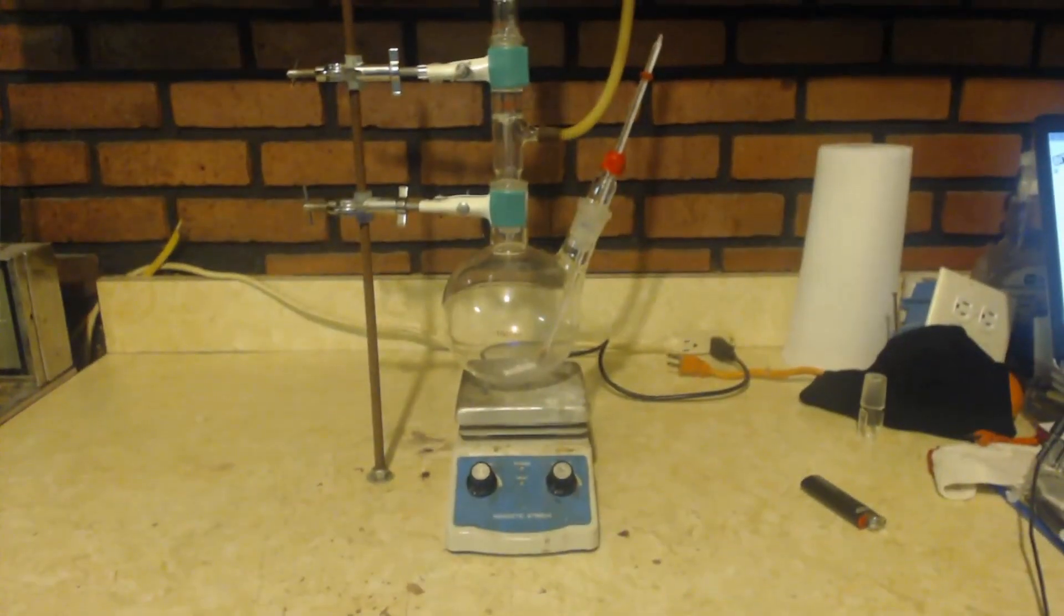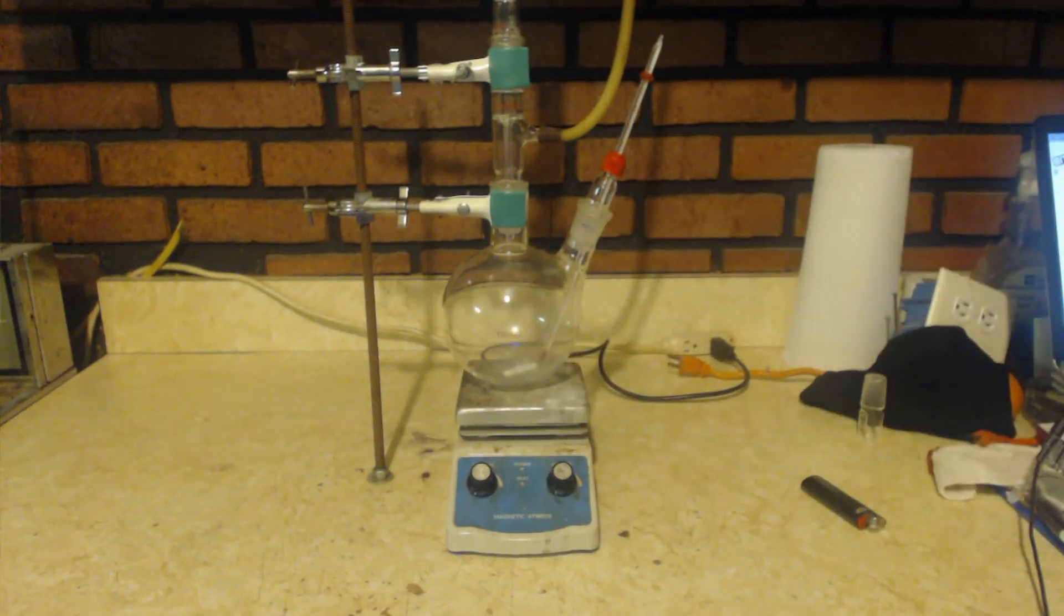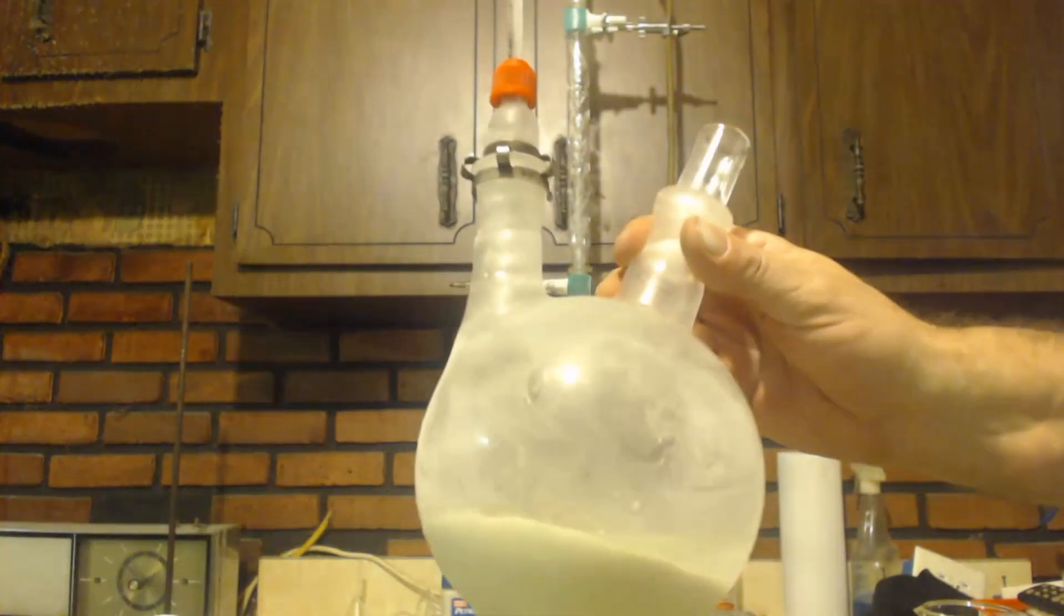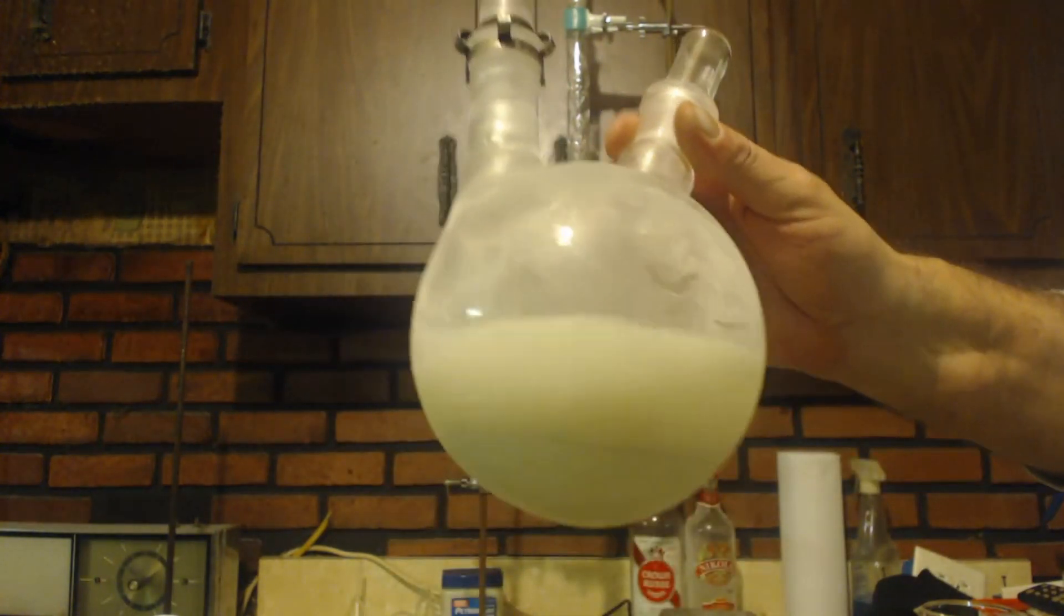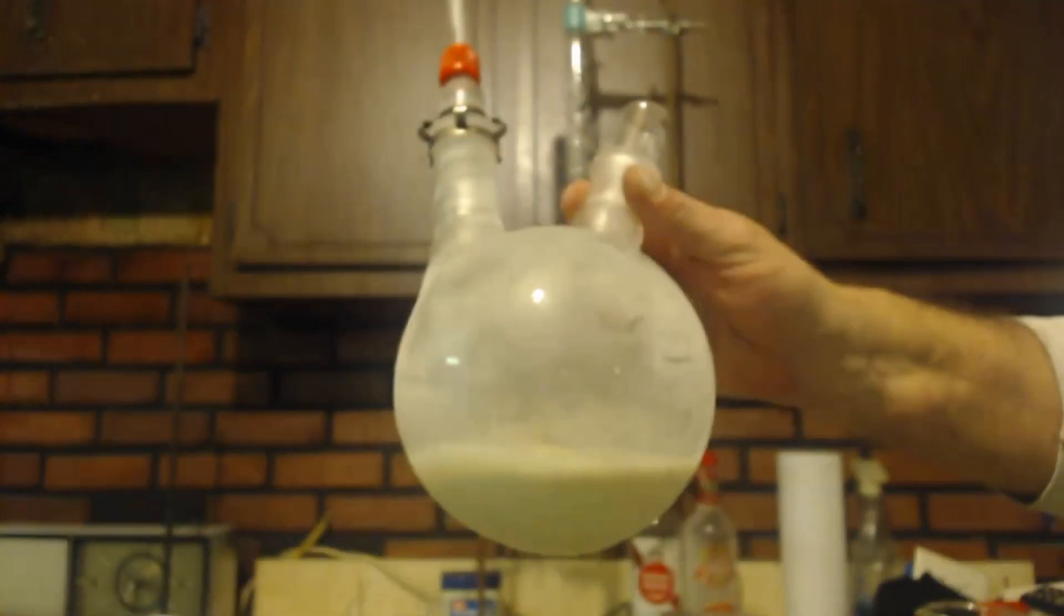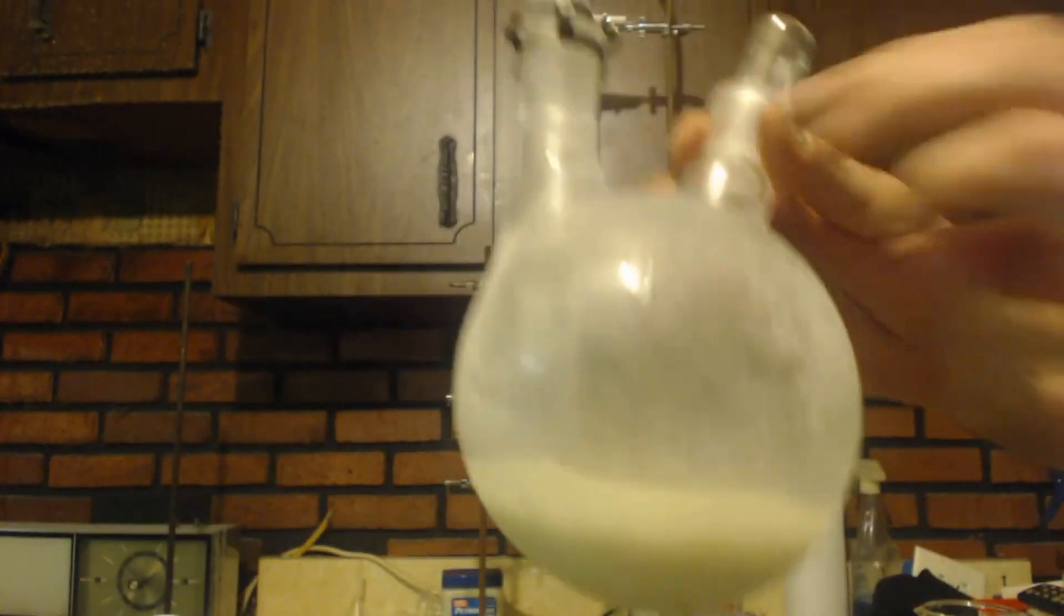So the first thing I'm going to do is I'm going to chill this down. This flask here. I'm going to take it off of here and put it in the freezer. Let it cool down. I have about 200 mils of diethyl ether in there. And you can see I got the silver nitrite.